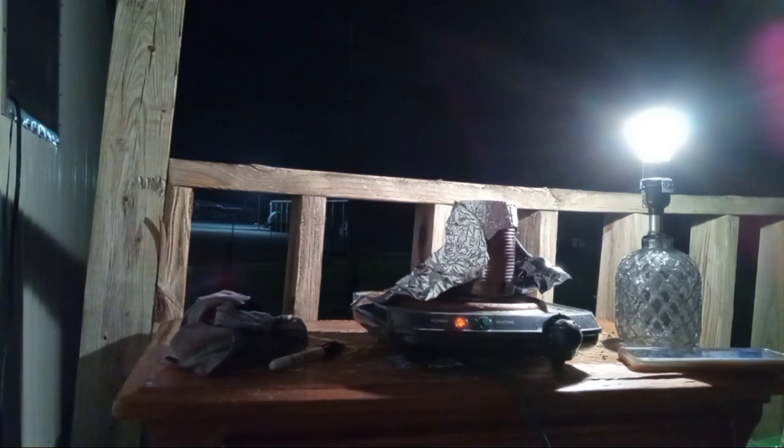So, yeah, I can definitely smell the ammonia. This certainly isn't something you want to do indoors. And it may foam up and get ruined. That happens to me sometimes. But so far, it's doing what it's supposed to.